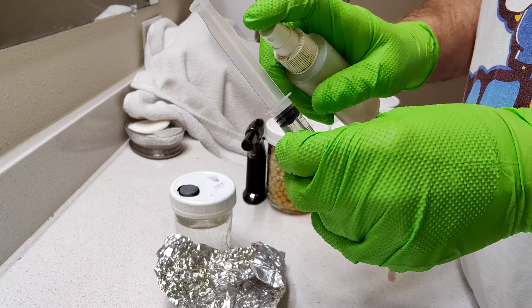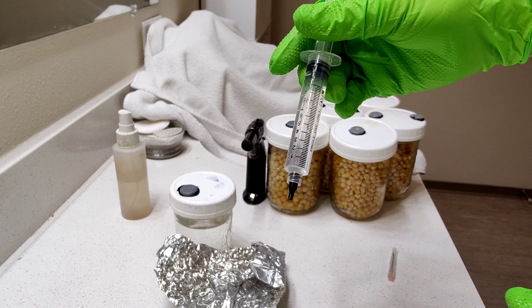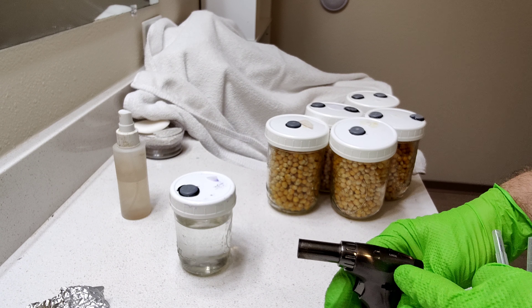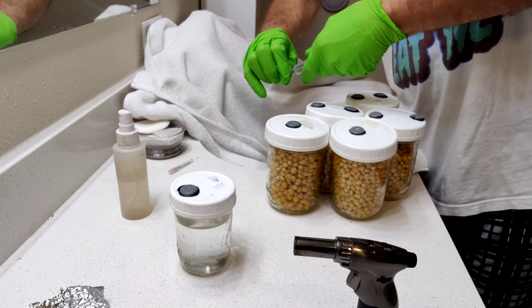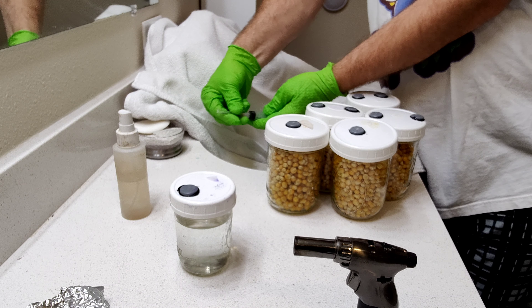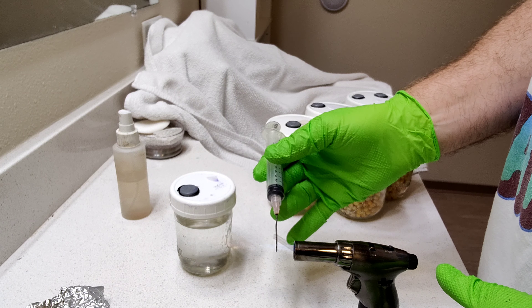I like to spray a little rubbing alcohol down in here, so that when I squeeze this water out, it pushes some rubbing alcohol along there — keeps it a little clean. I'm going to take off my stopper, squirt this water out, put on my needle, and start my torch.